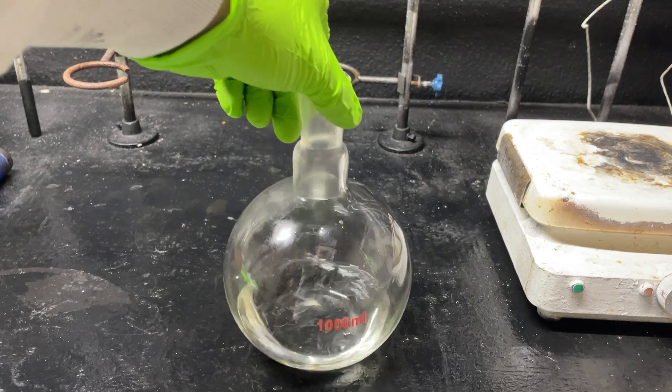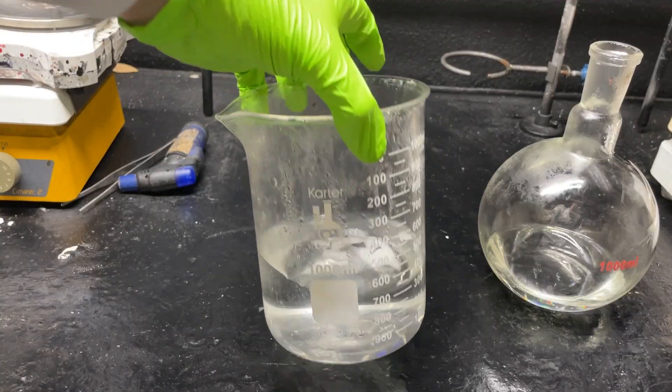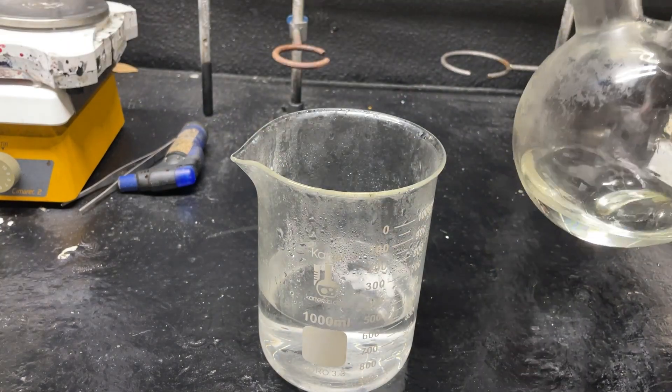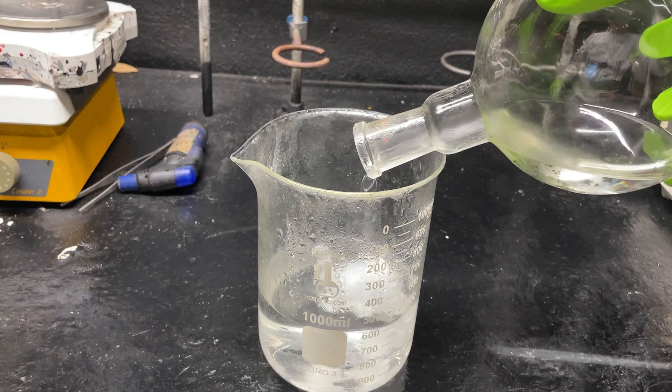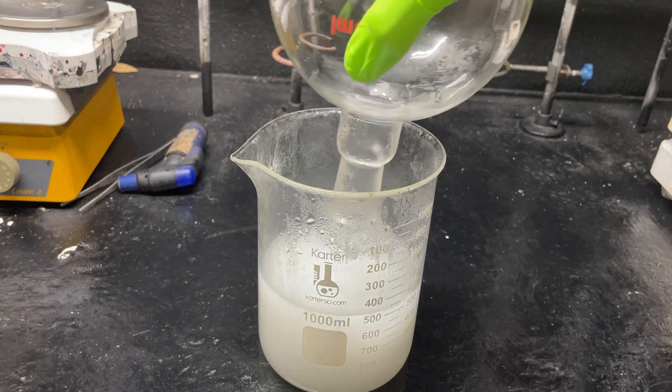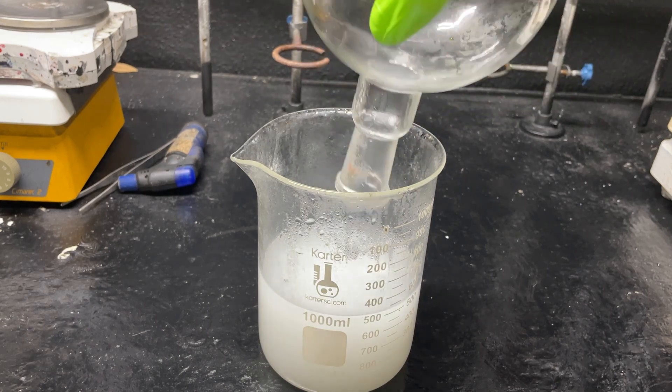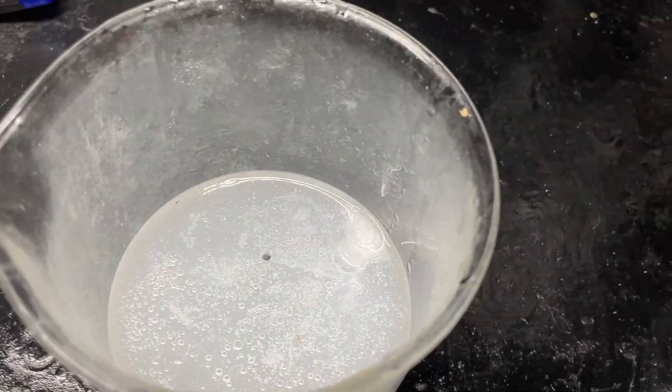Okay now to a beaker of ice water I'm going to pour our solution into here very carefully. You'll see there is some kind of precipitate on the surface - there's an oil and that is our chloroacetophenone.